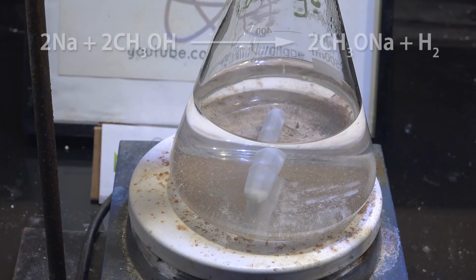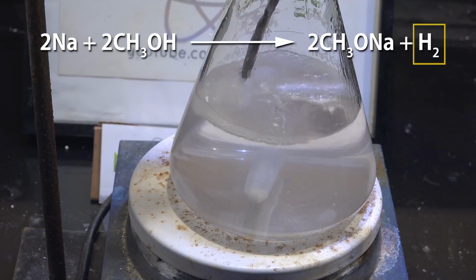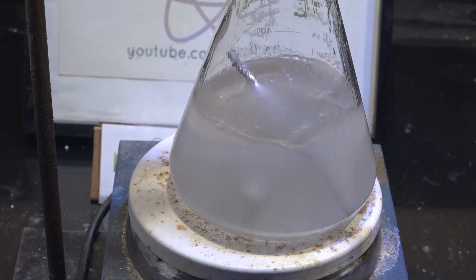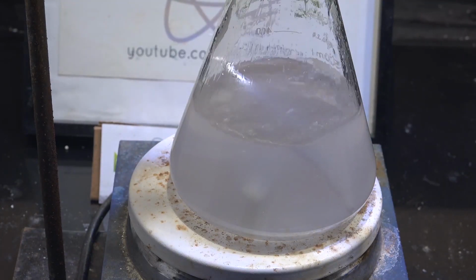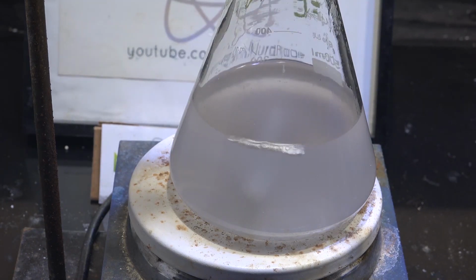What we're doing is reacting sodium with methanol to make sodium methoxide while generating hydrogen gas. Considering that methanol and hydrogen gas are both highly flammable, this can go very bad very quickly. Eventually, all the sodium will react and we'll have a solution of sodium methoxide and methanol.